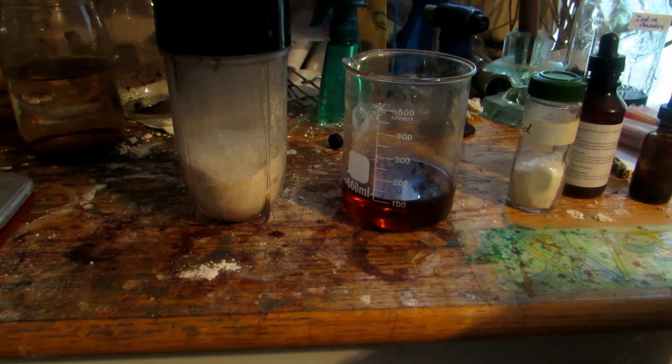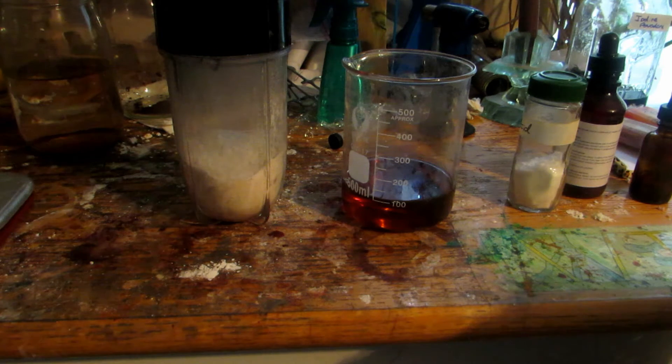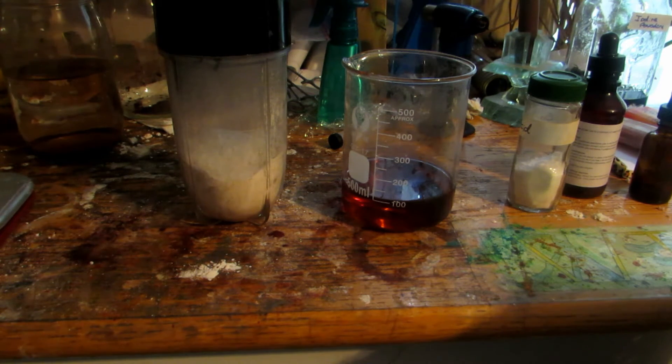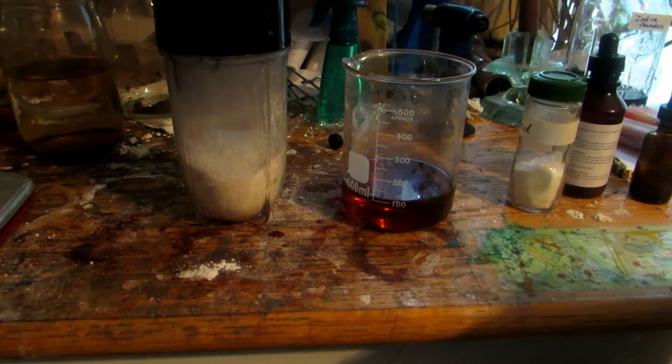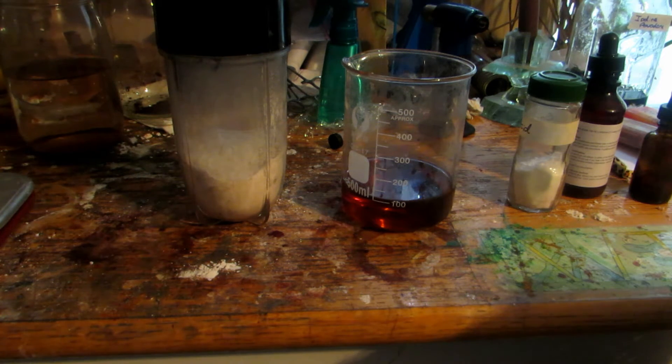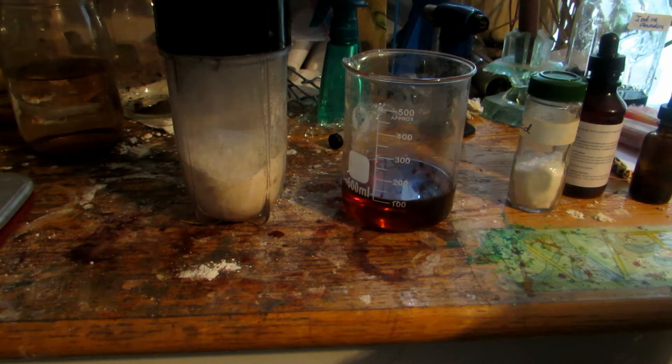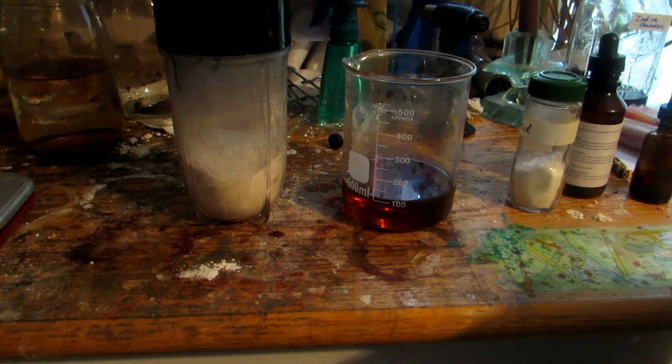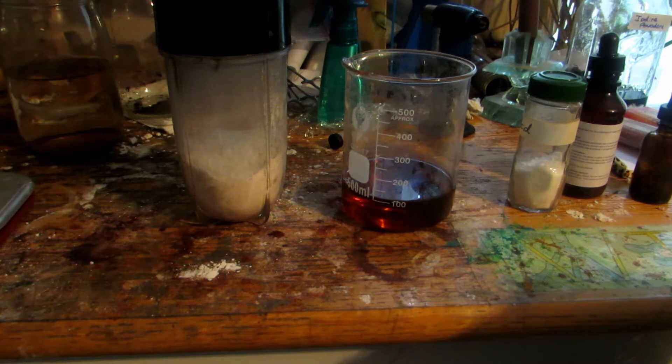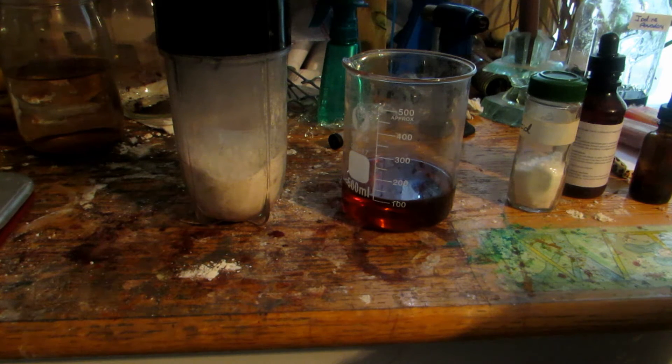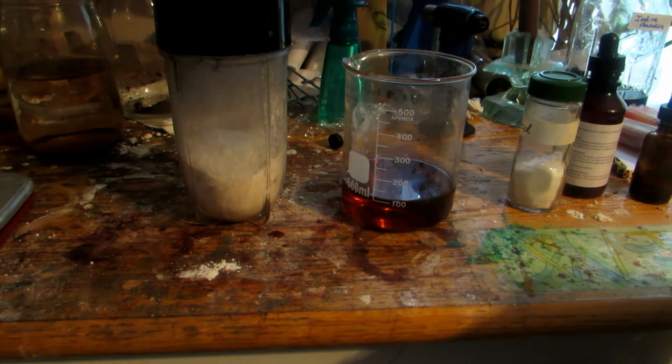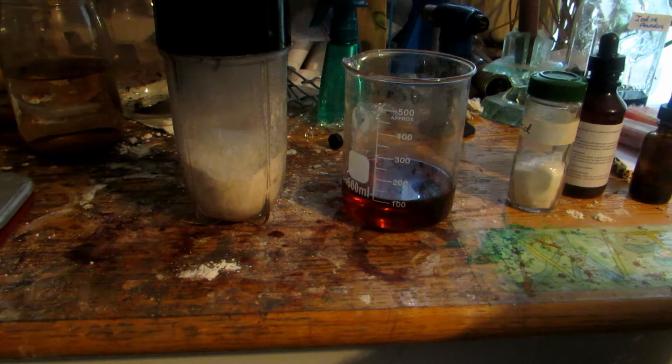And today we're going to be reattempting this, except this time we're going to be doing it slightly different. We're going to be going up between 85% and 90% concentration, so very concentrated nitric acid, which can be extremely dangerous to handle. At concentrations above 85%, it's actually recommended not to wear gloves with it because depending on the concentration, the gloves will actually burst into flames and be rapidly dissolved. So you have to be really careful with this, but definitely don't omit other safety gear.